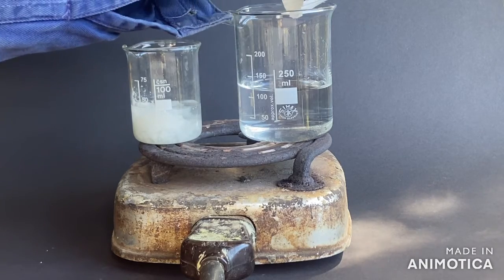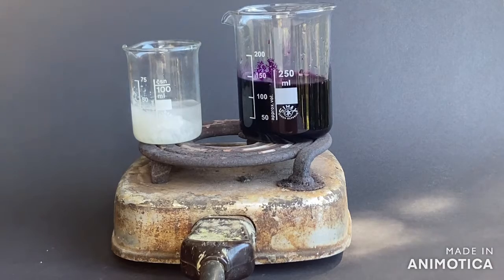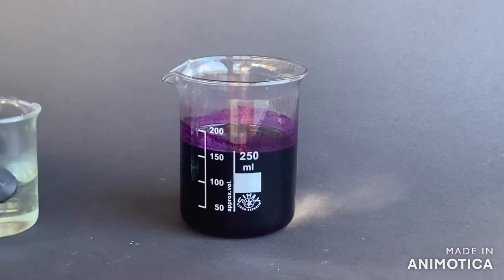Into the larger one I added 30 grams of potassium permanganate. Then I added the chloride solution into the permanganate solution.